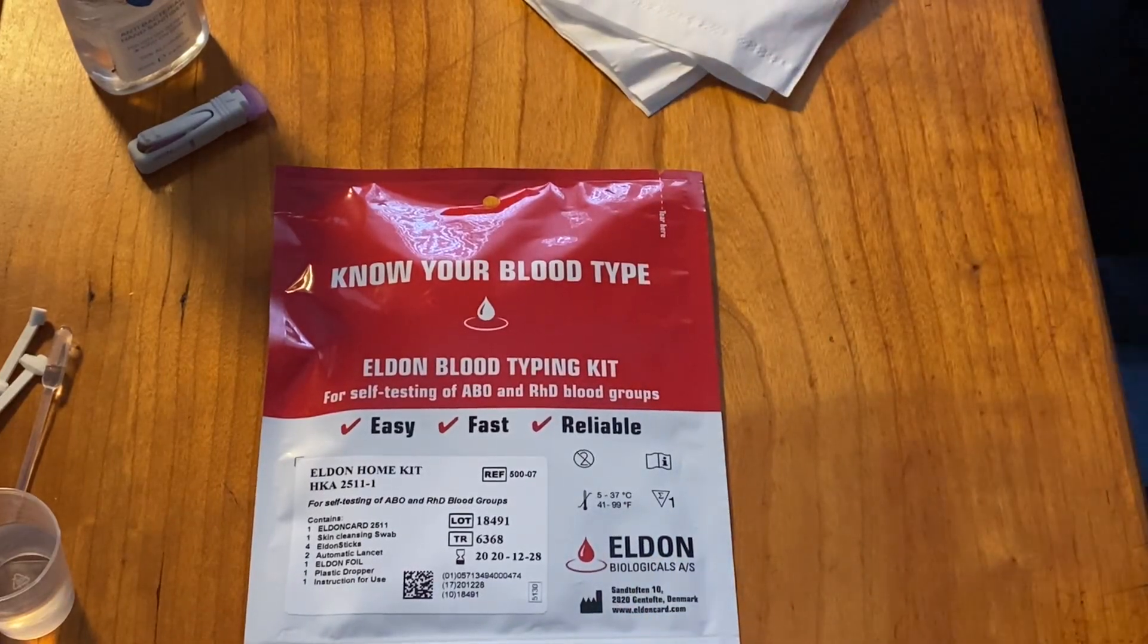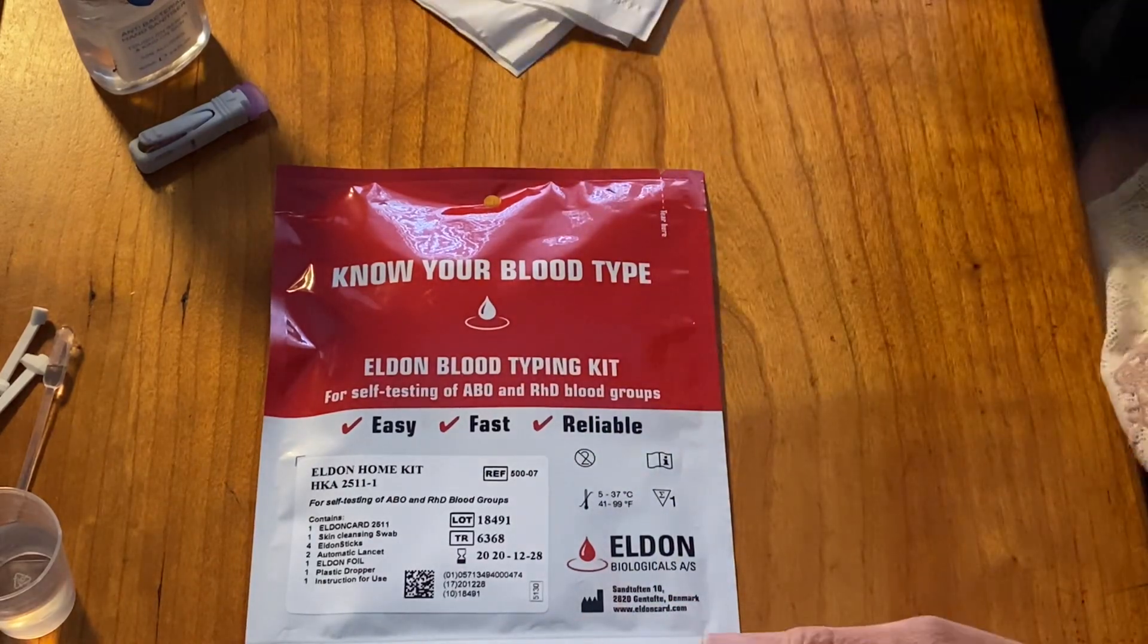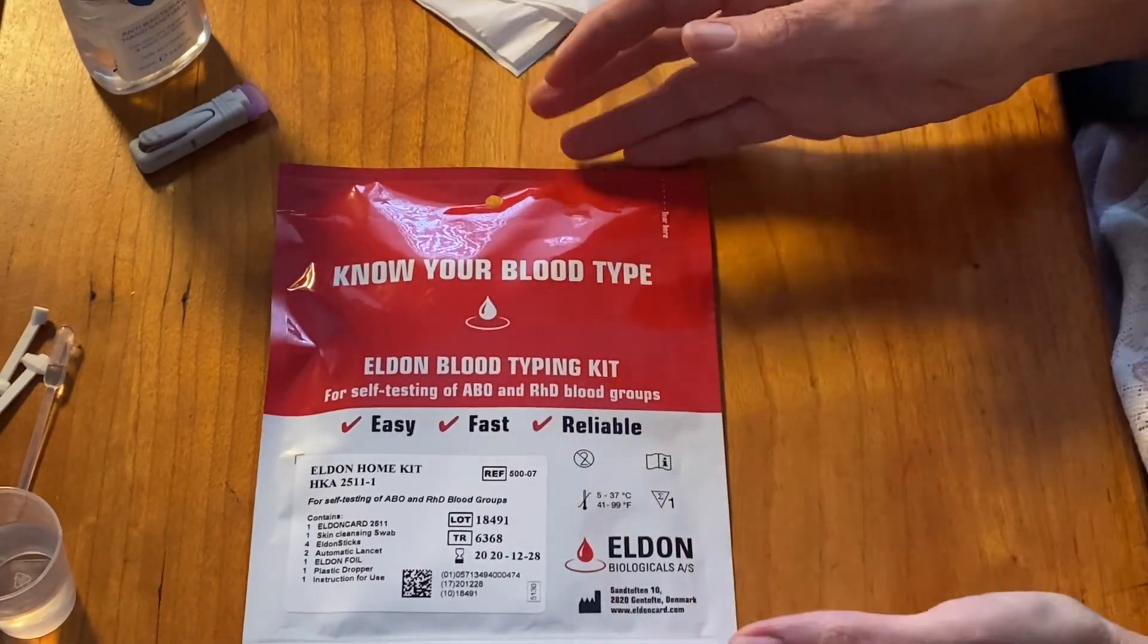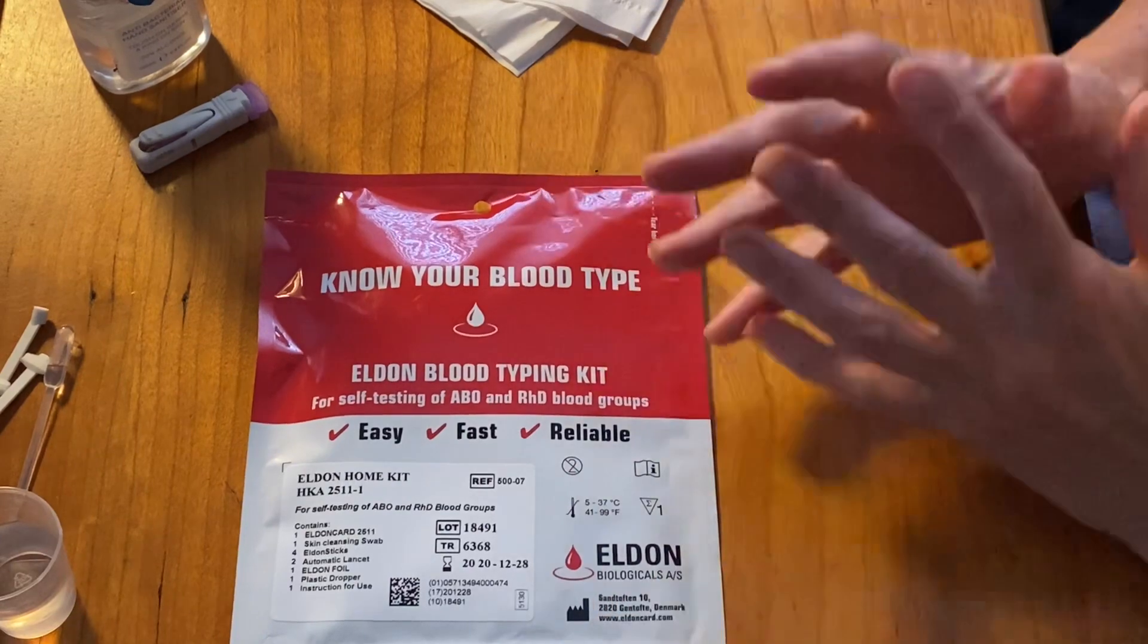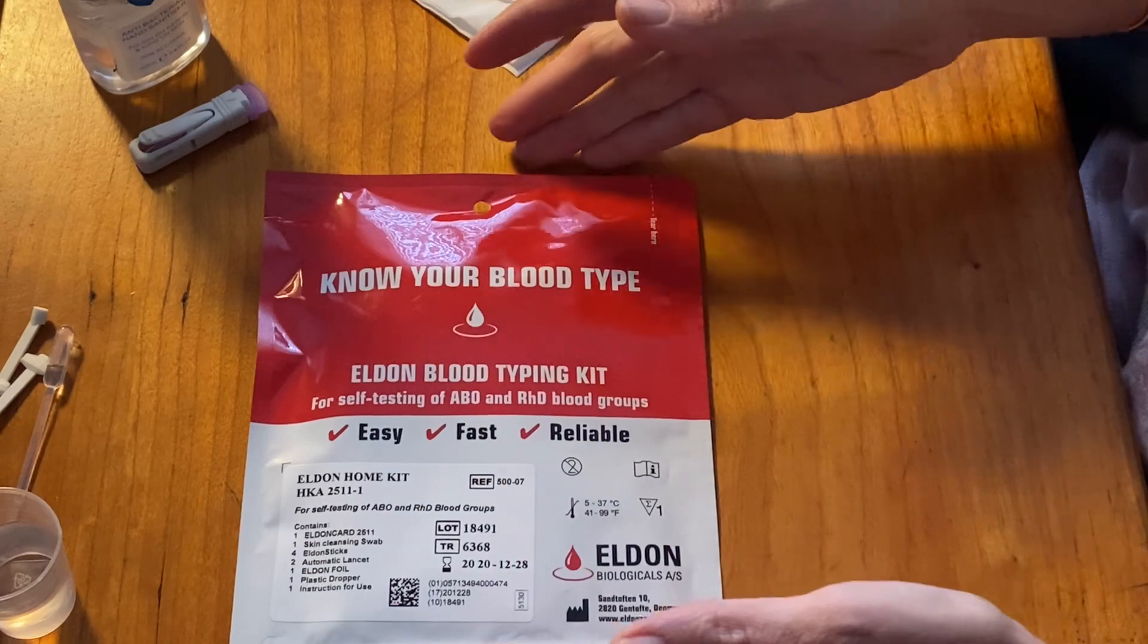In this video I'm going to show you how to test your blood type. It's a very important part of a nutrition consultation with myself because your blood type can determine a lot about your health, especially in terms of digestion.